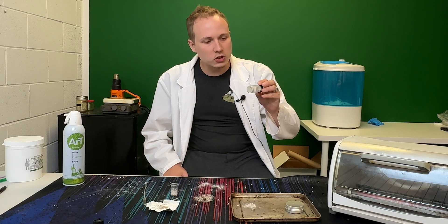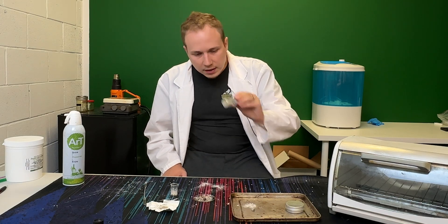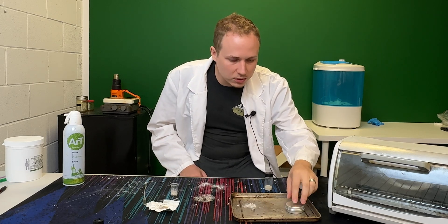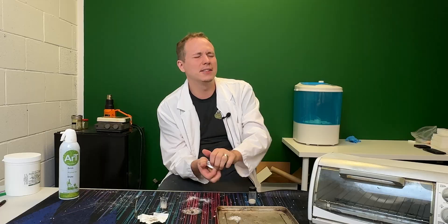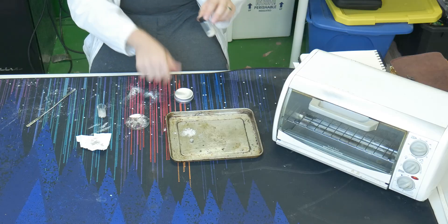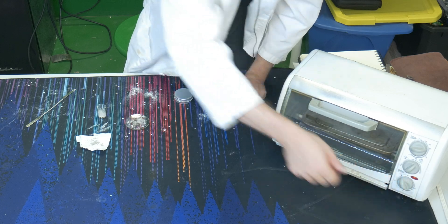Now this is the sealed beaker. This one looks like it didn't process quite as much because it was a sealed container — let's take a look. Shake it up a bit. This one isn't quite done, I don't think, and as I said earlier, that's just due to this being a sealed container; we have to wait for the air inside to warm up, so it's going to take a little longer. I presume the same will be true for this, but let's take a look. It is flatter, so it might have worked better. I can't open it — well, I don't think these containers are meant to be heated. It seems the heat has kind of sealed it. Maybe it's the Zeolite interacting with the metal container as well, but I can't open that right now. I'll set that back in the oven.